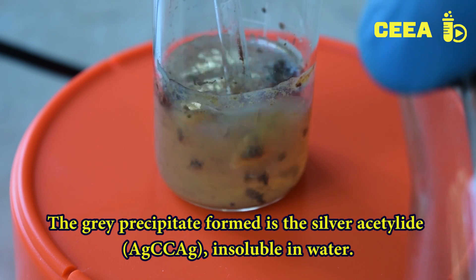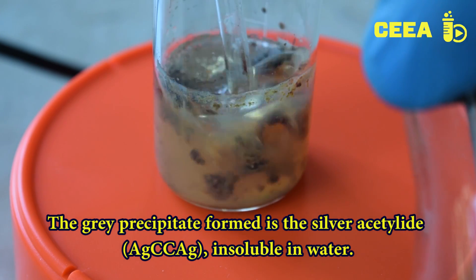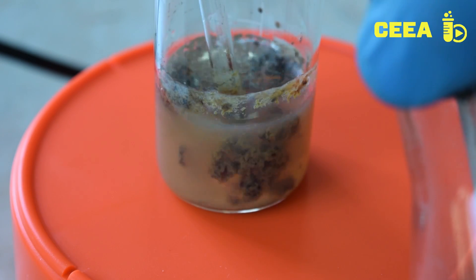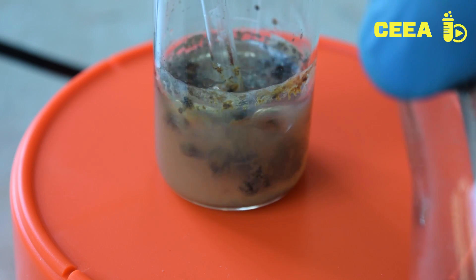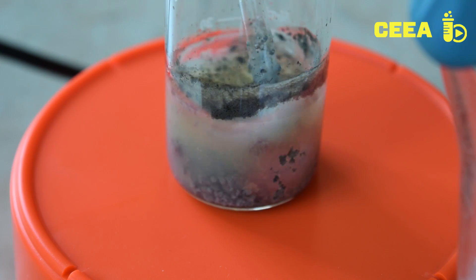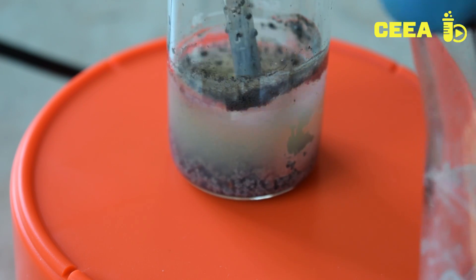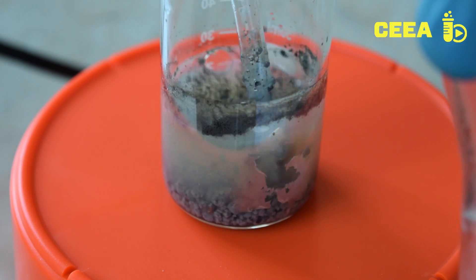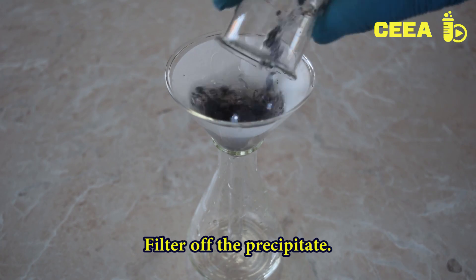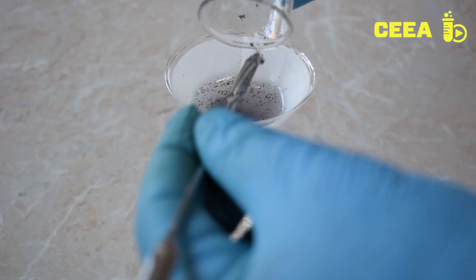The gray precipitate formed is silver acetylide. As it is a transitional metal acetylide, it is insoluble in water.